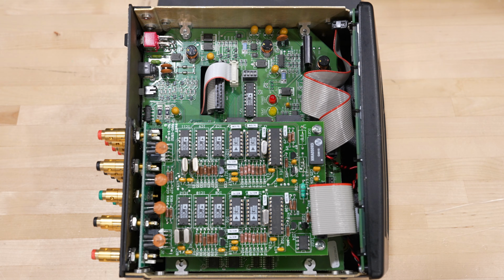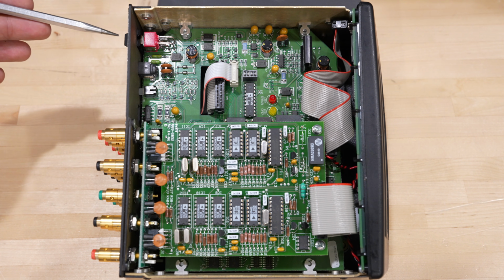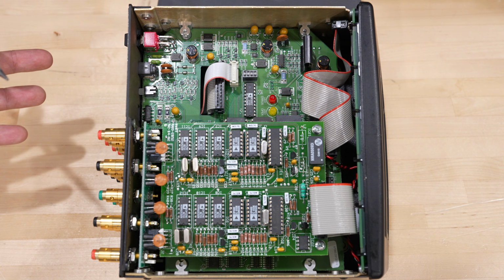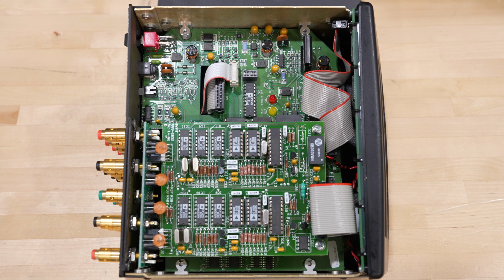Let's see. So this unit does require a DC power supply, about 15 volts 1 amp that you can apply here in the terminal jack in the back, and it does have a power switch and a charge LED. And that's because on the other side of it you can put a battery in there, which then can make this be completely portable as well as very low noise with the built-in battery. Now, having said that, when I plugged it in, nothing would happen, even the charge LED wouldn't turn on.